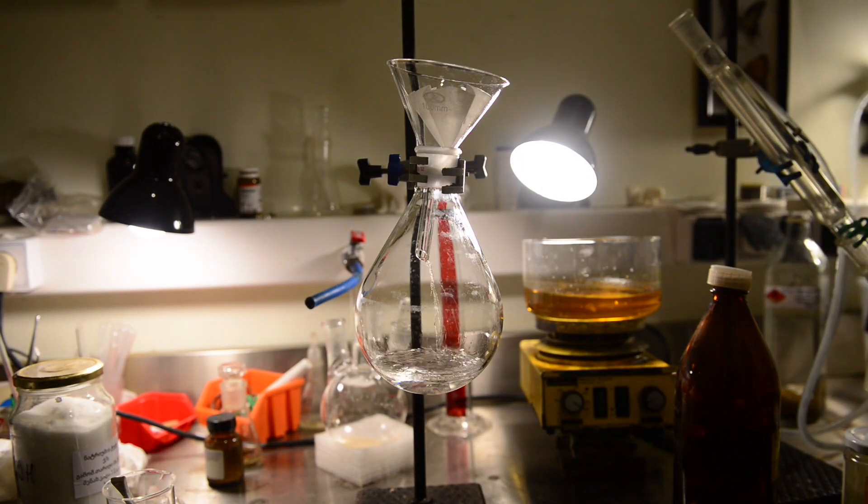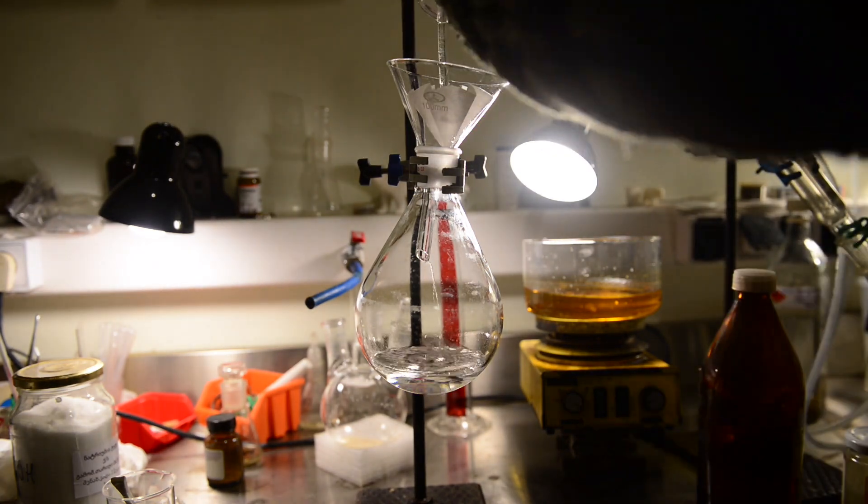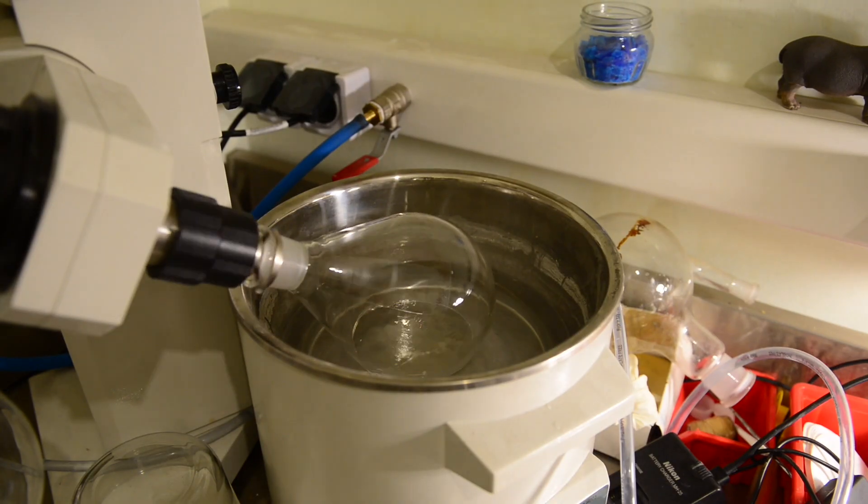At the final step of the solvent evaporation we use rotary evaporator. Under vacuum the solvent is evaporated within minutes.